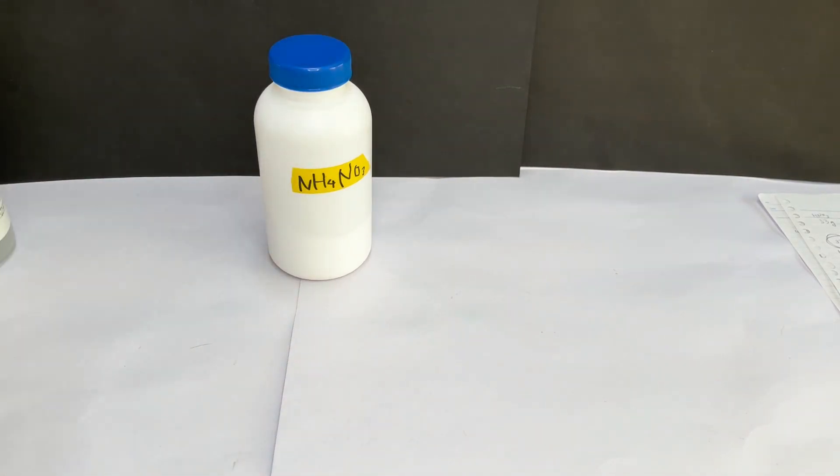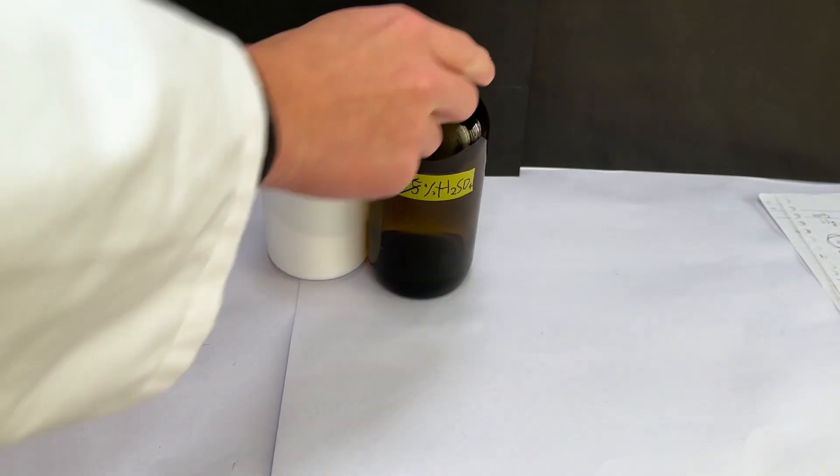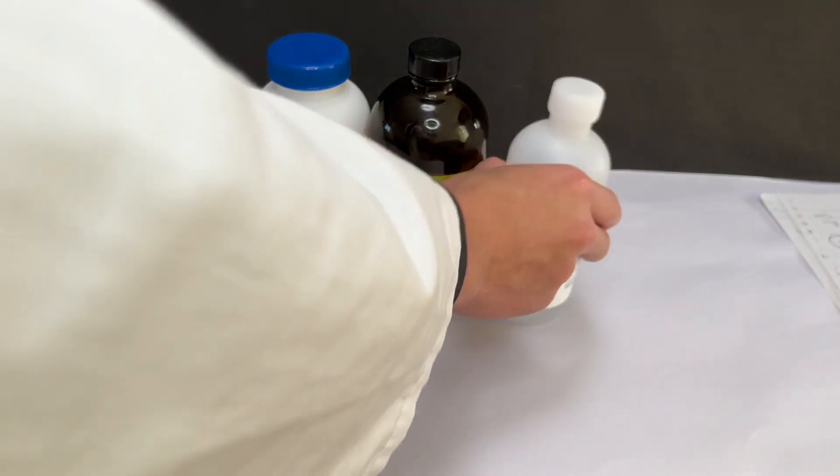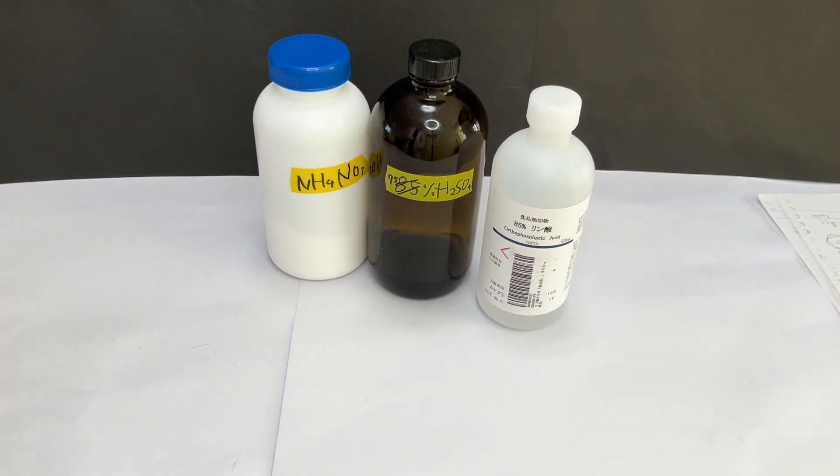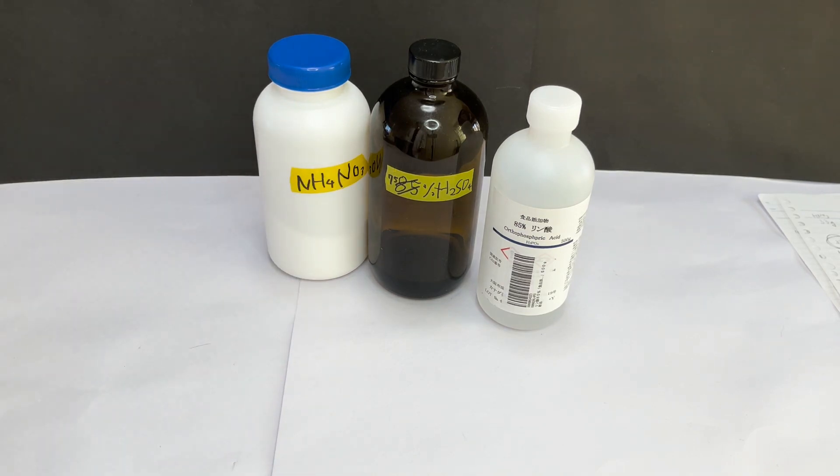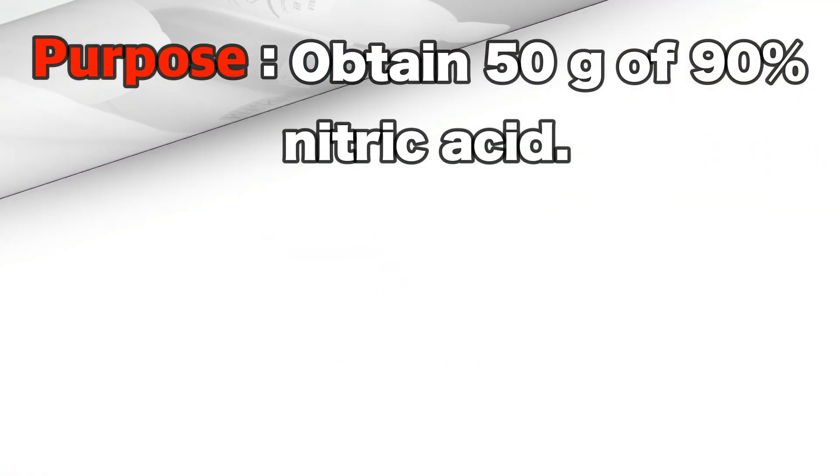In this experiment, I'm gonna use ammonium nitrate and 75% sulfuric acid that I have concentrated from 10% sulfuric acid, and I'm also going to use 85% phosphoric acid. This experiment's purpose is to obtain 50 grams of 90% nitric acid.